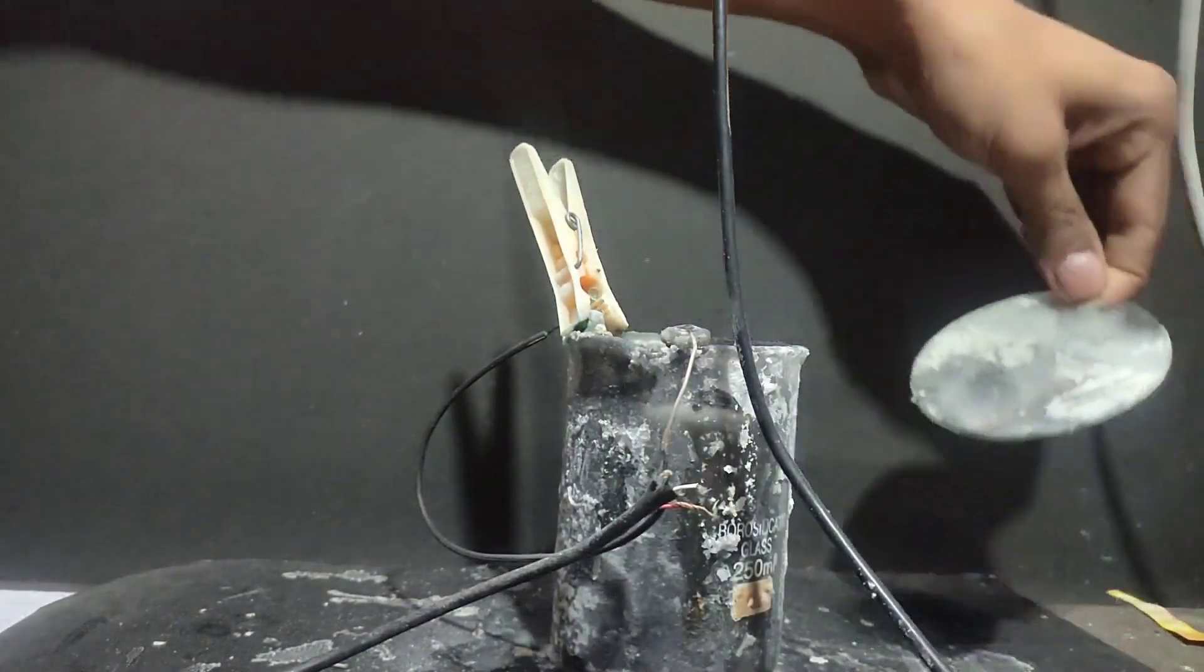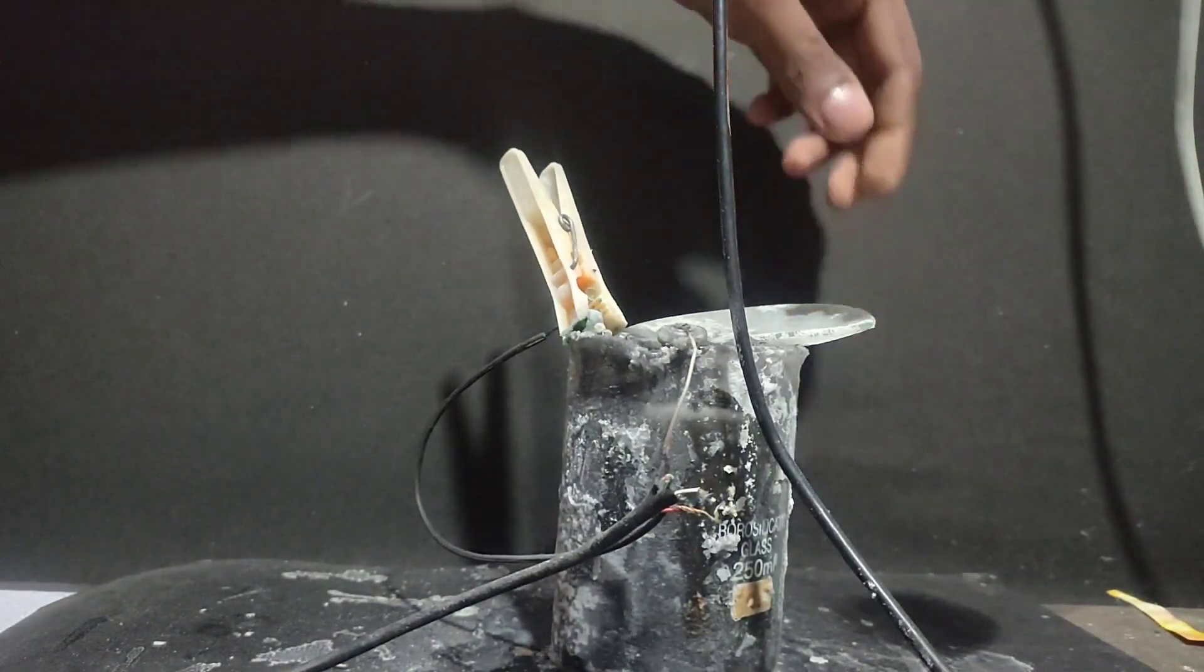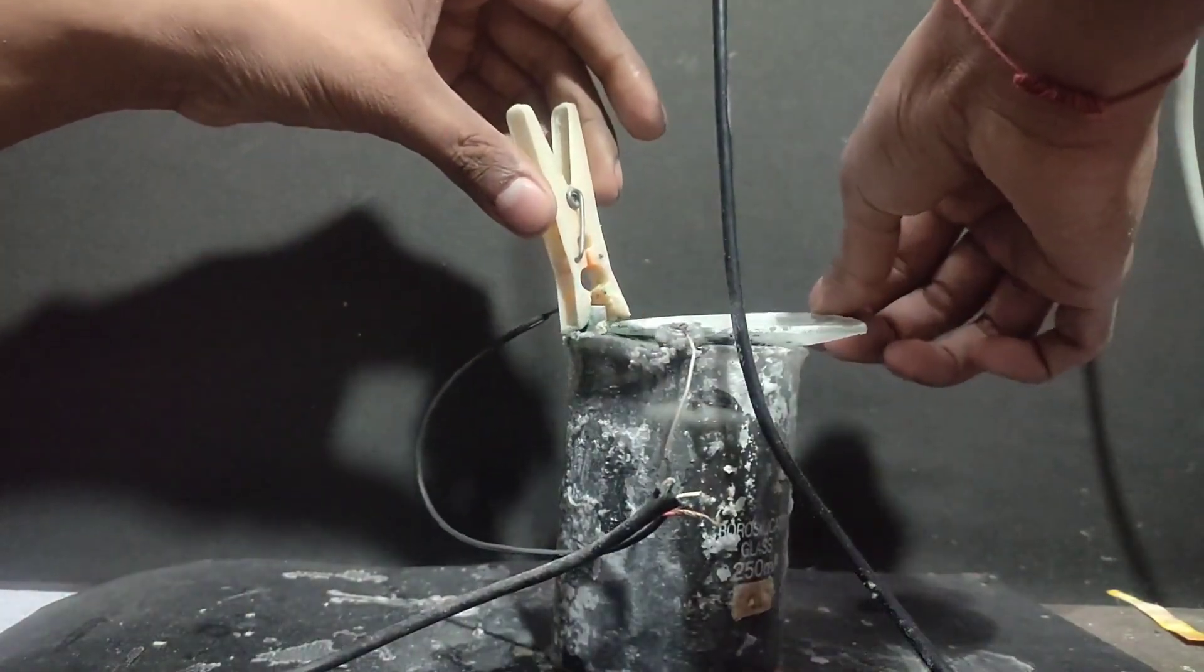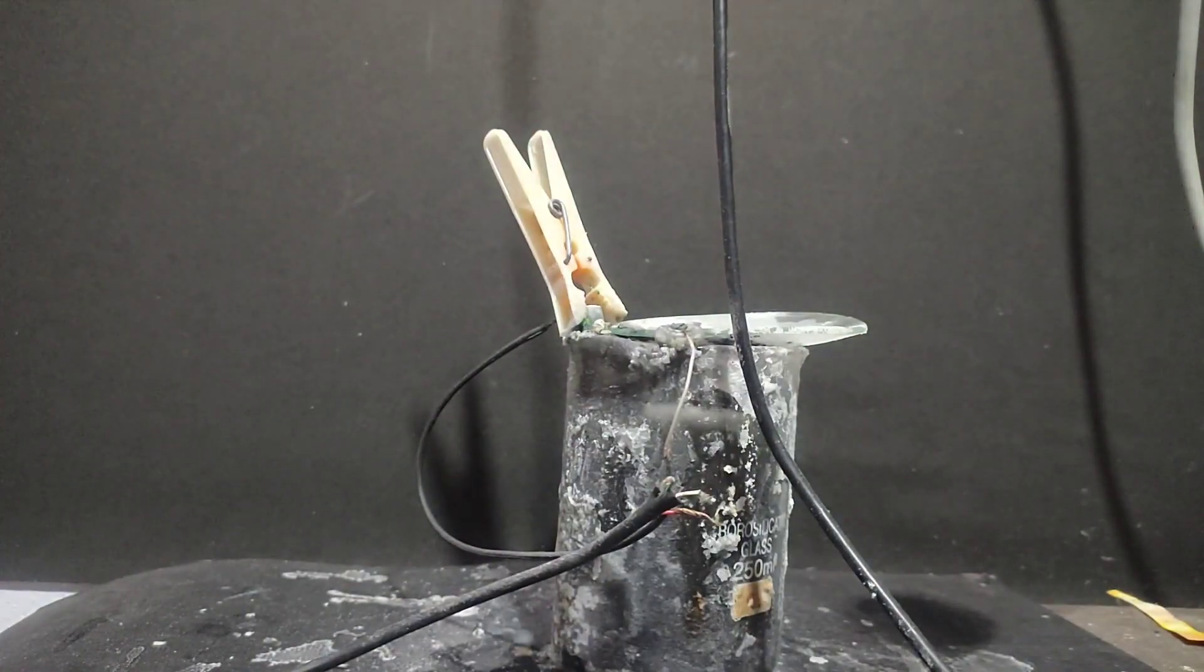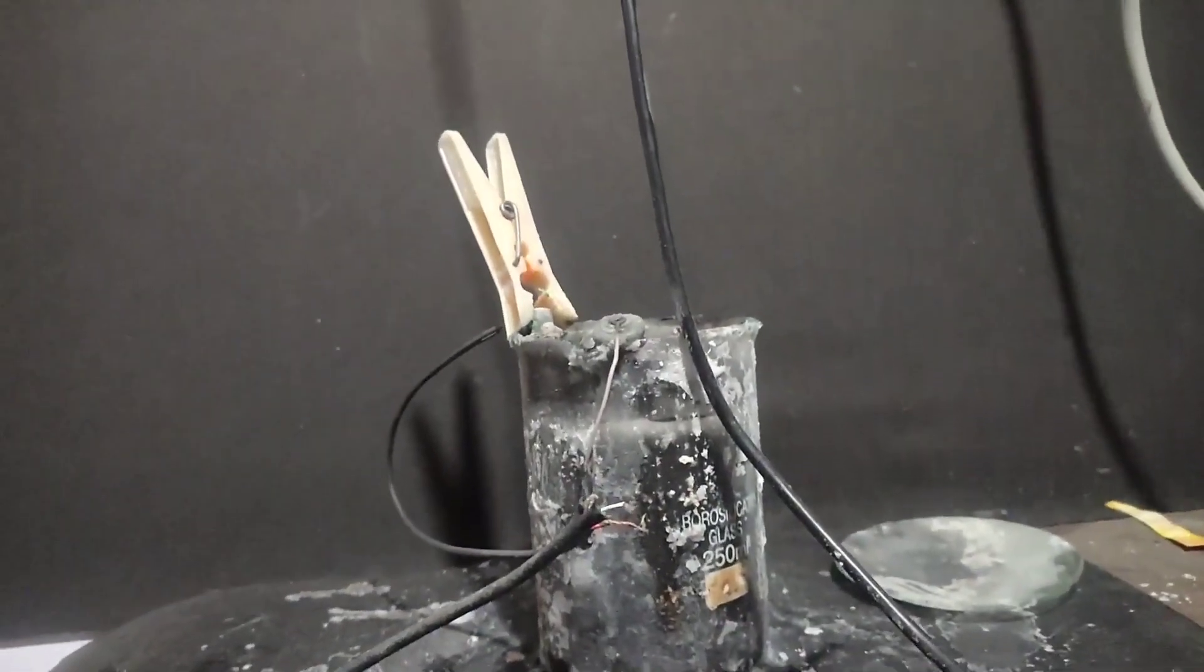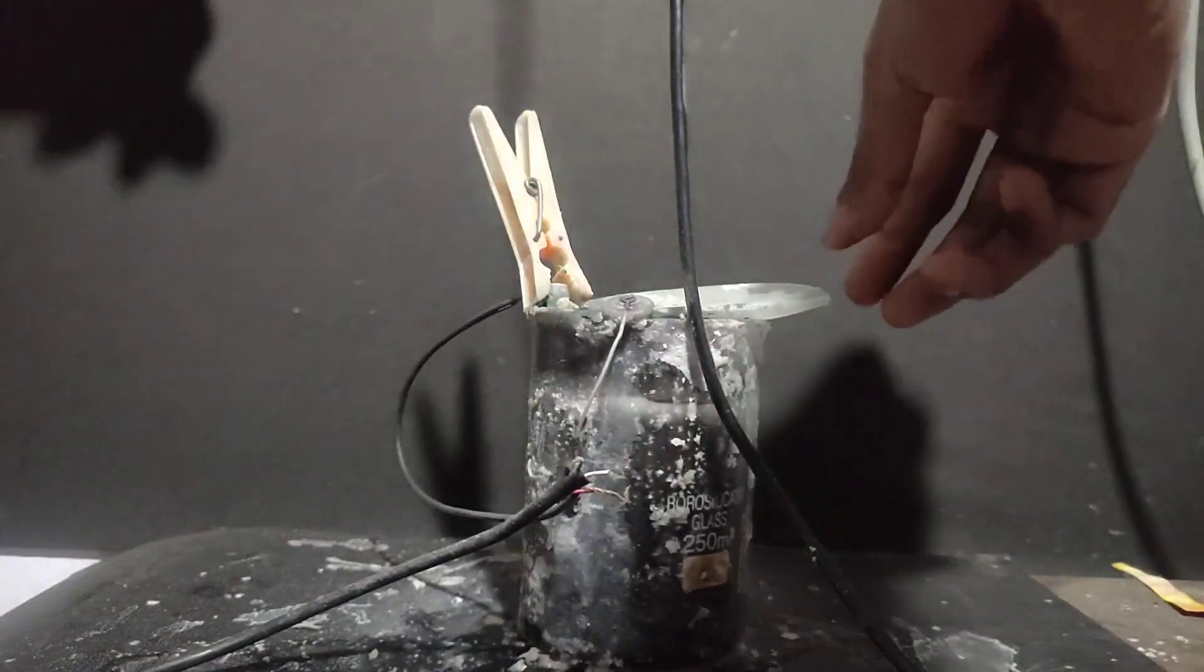I let this electrolysis run for 10 days and kept adding potassium chloride solution to keep the supply of potassium chloride from time to time. The anode was getting disintegrated and the solution was getting black.